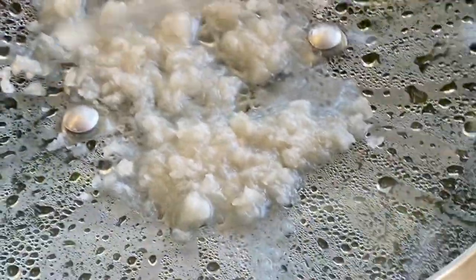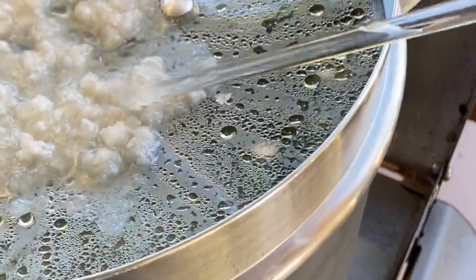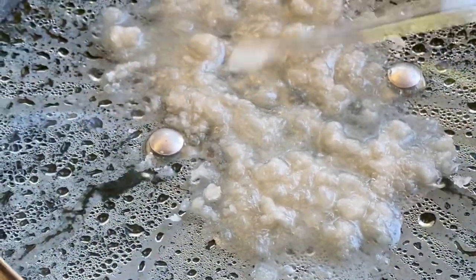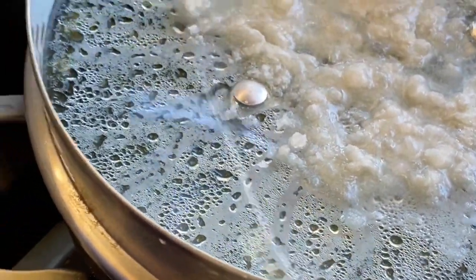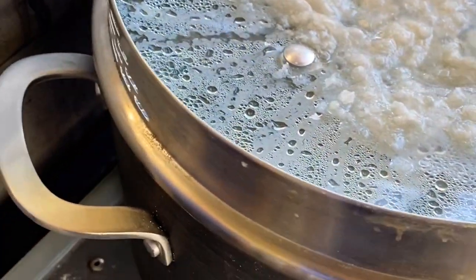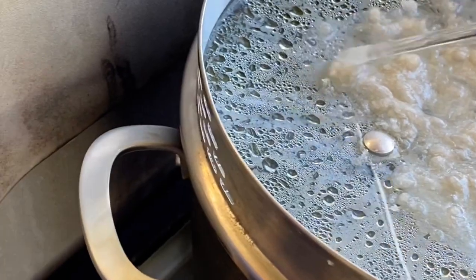So here's the crystals now that they're melted. I'm pushing them around with this glass stir rod, and I'm probably gonna let them sit like this for a couple of minutes. Yeah, it's starting to liquefy, and I'll let it sit like this for a couple of minutes so any excess water or toluene gets evaporated, and then I'll turn off the heat and I'll let the acid recondense and solidify, and we should have pure crystals then.